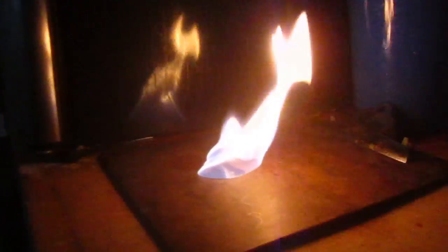Okay, here's a big one. Whoa! That was hot. A little bit hints of, there we go, that's the flame color. A little bit orange from the isopropyl alcohol, but there you go. That's for some burning.